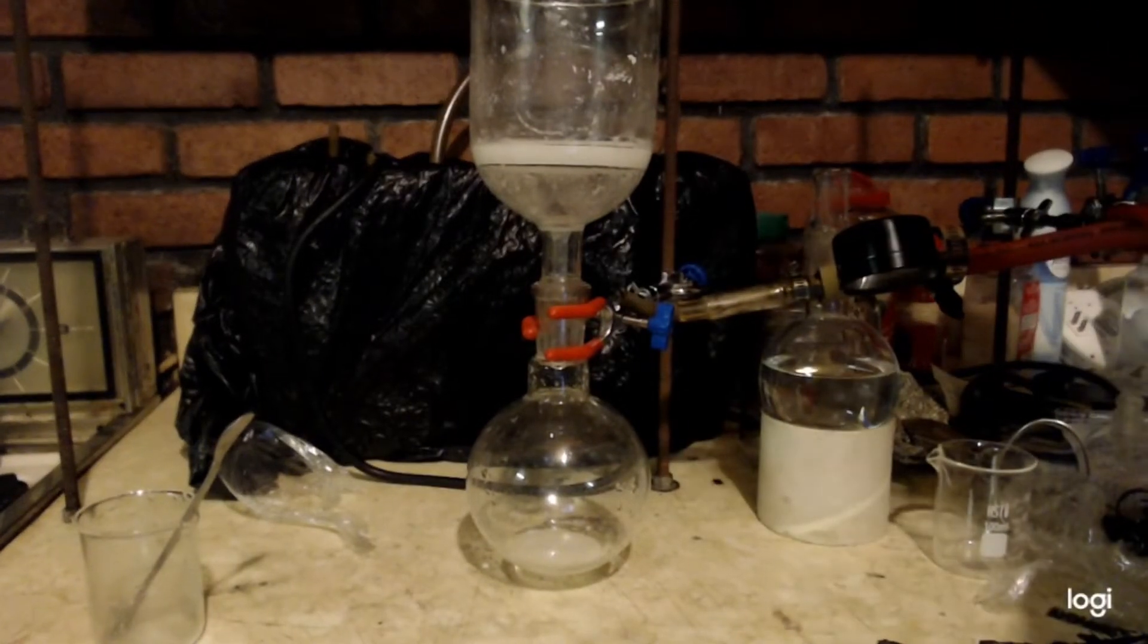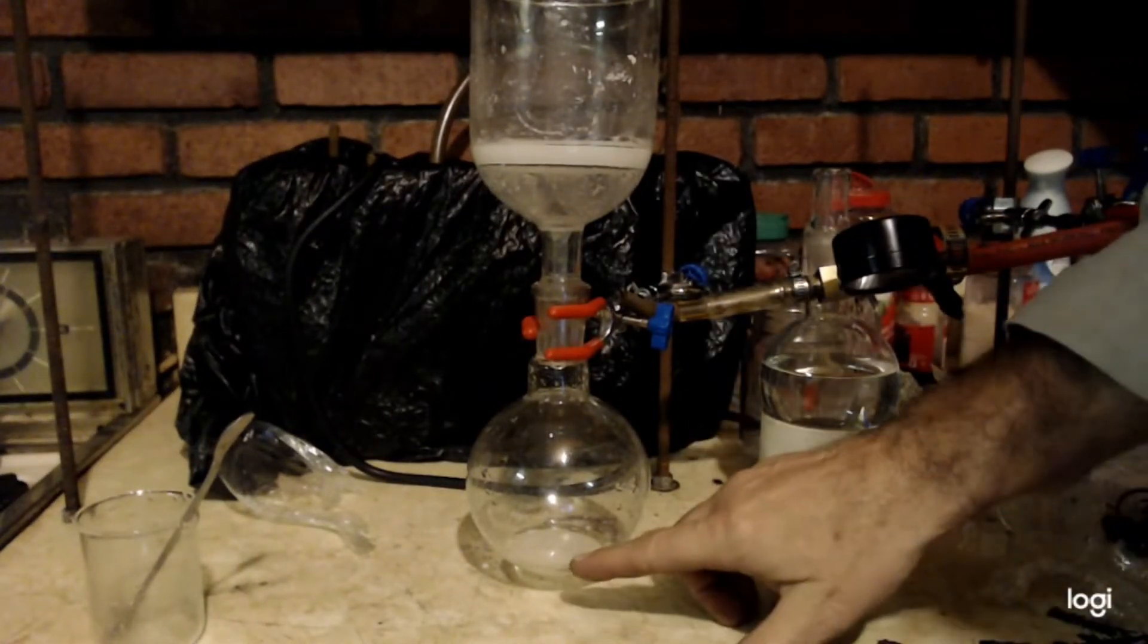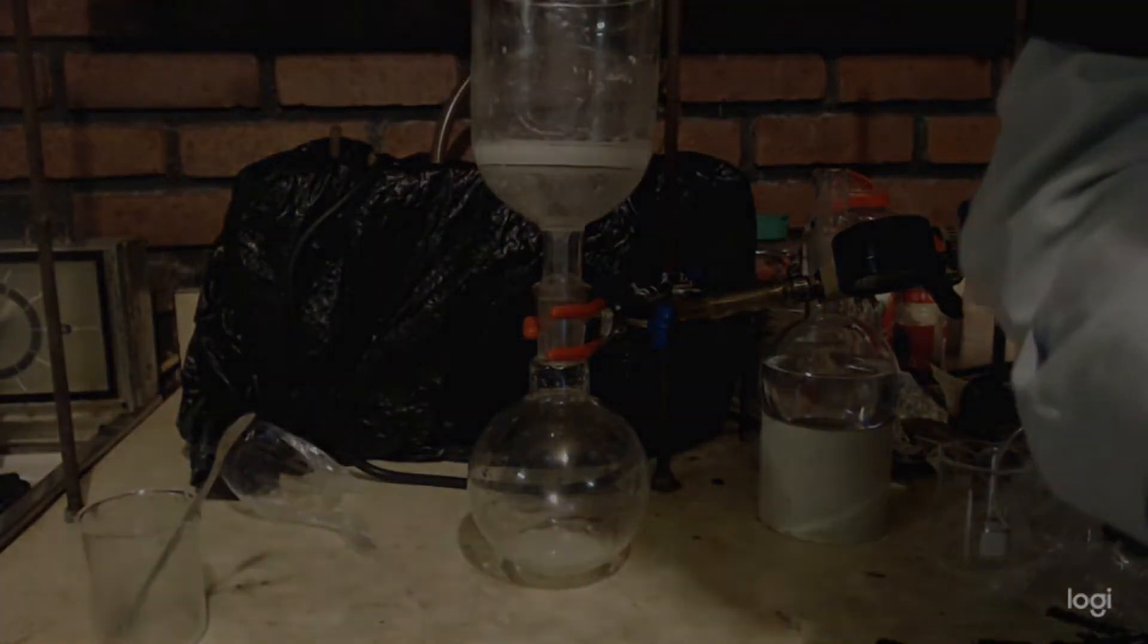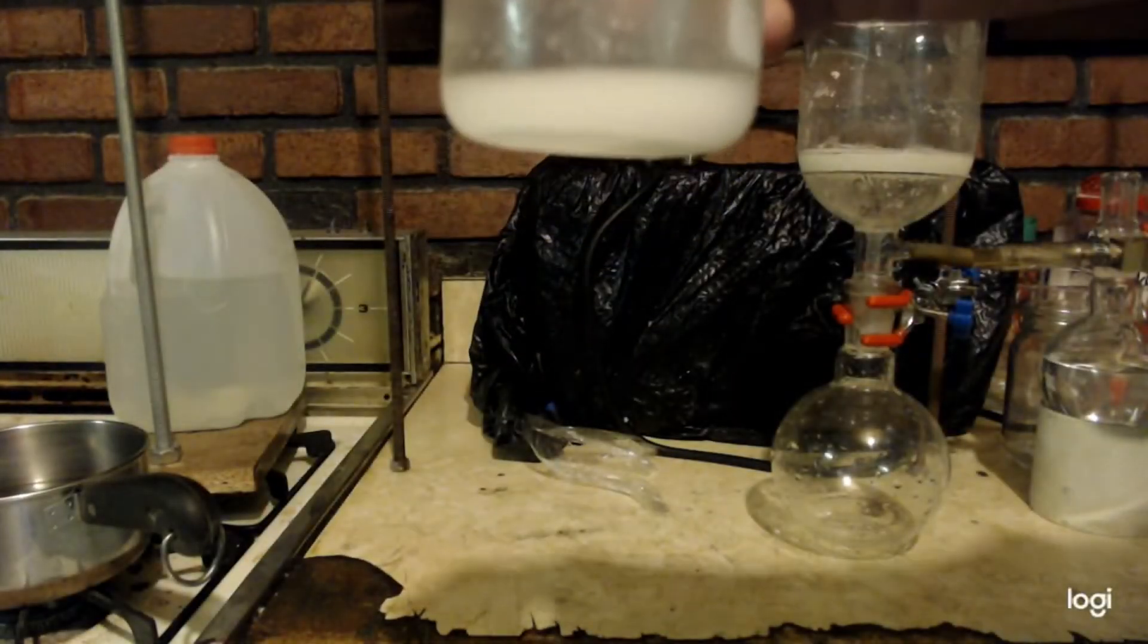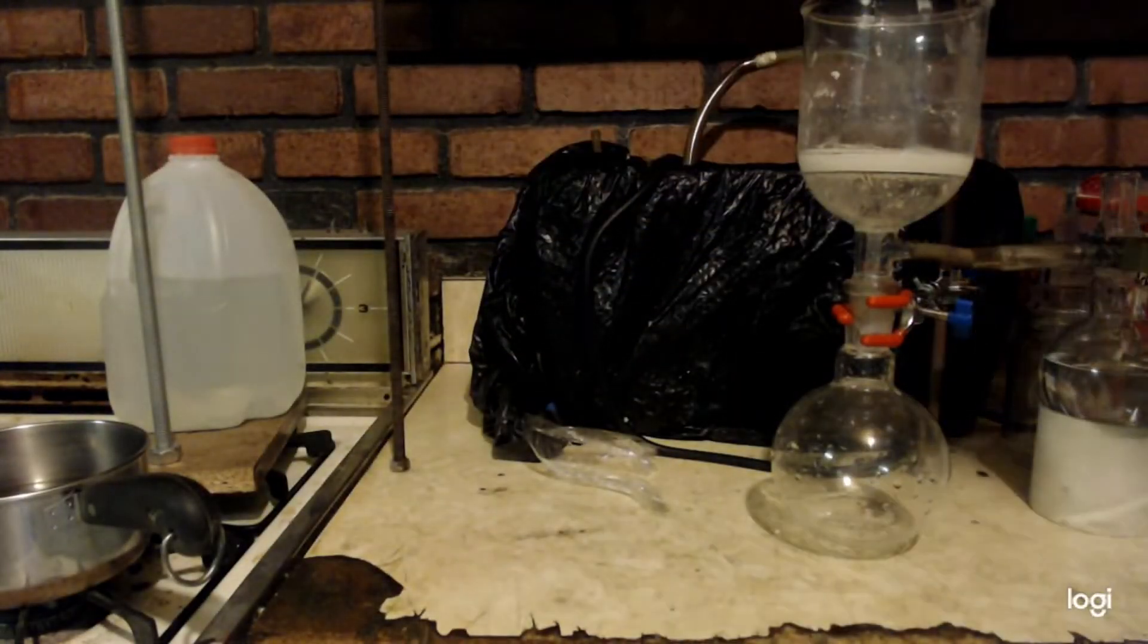Now I'm going to take this little bit of water that got through. I'm going to put it in the freezer and try and get another batch. It didn't get much out, but there's a little bit there, so I'm going to filter it.